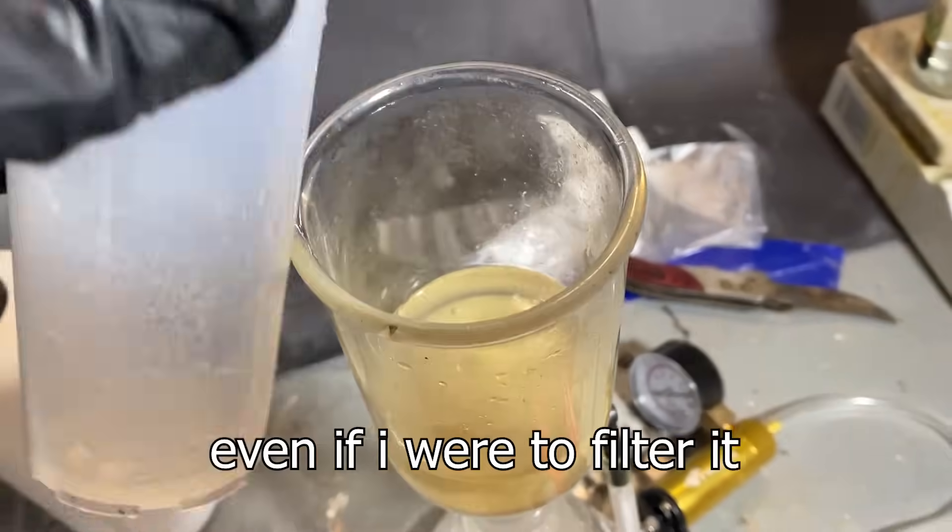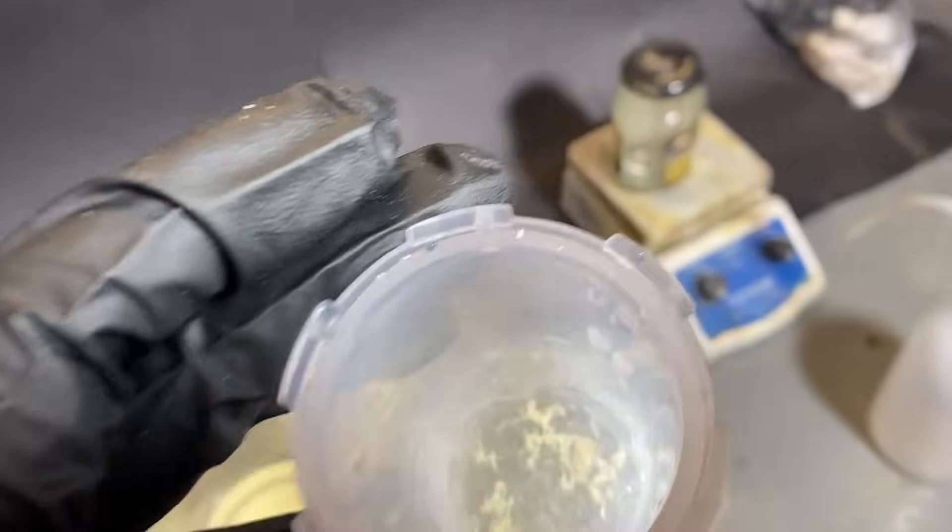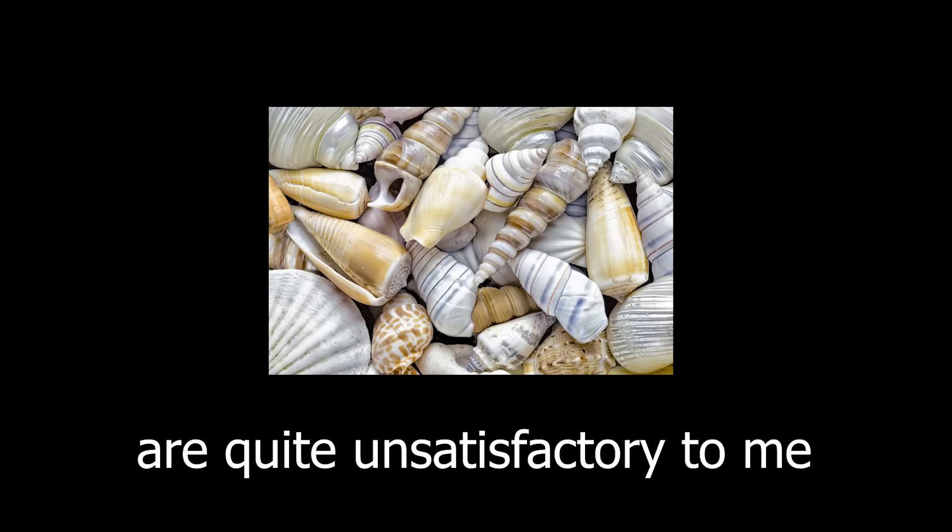After that, I woke up to an extremely shitty yield. I don't think even if I were to filter it, then I would be able to weigh it. Anyway guys, I guess we did it. We made 5-aminotetrazole from seashells. However, these amounts are quite unsatisfactory to me.